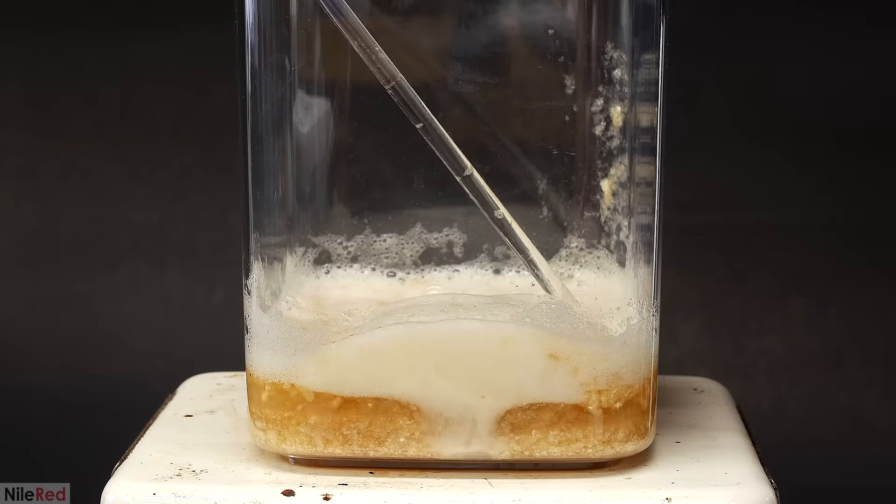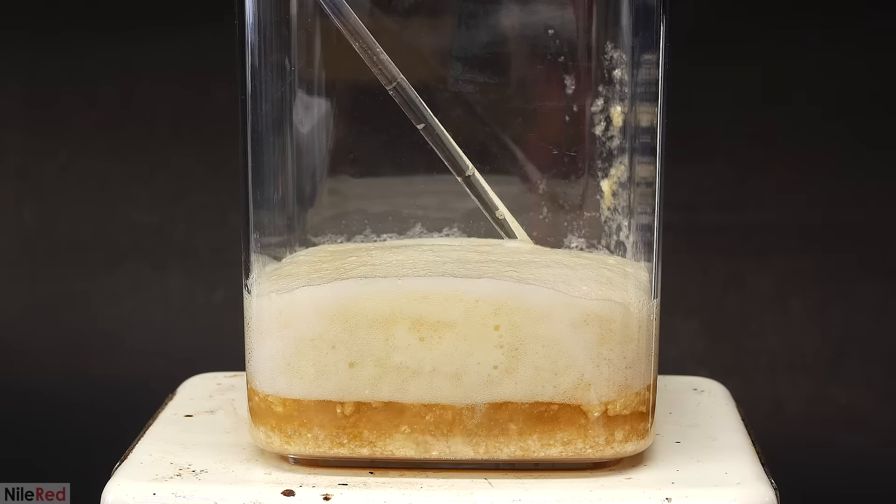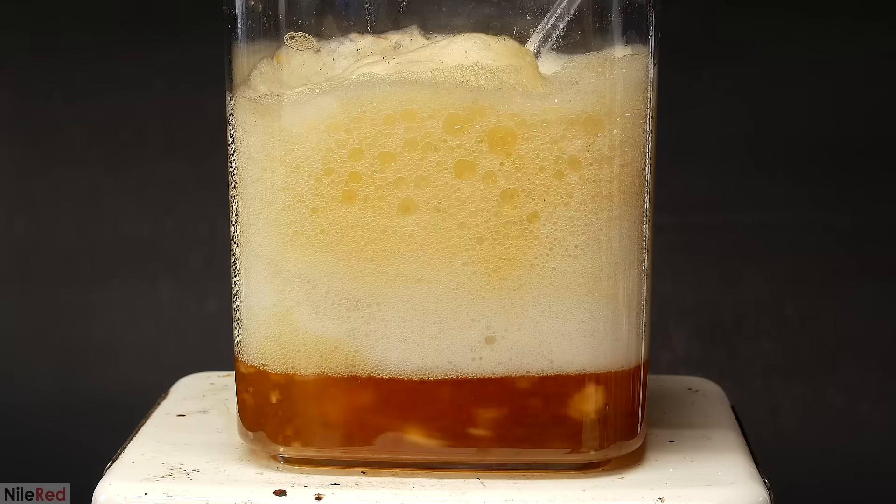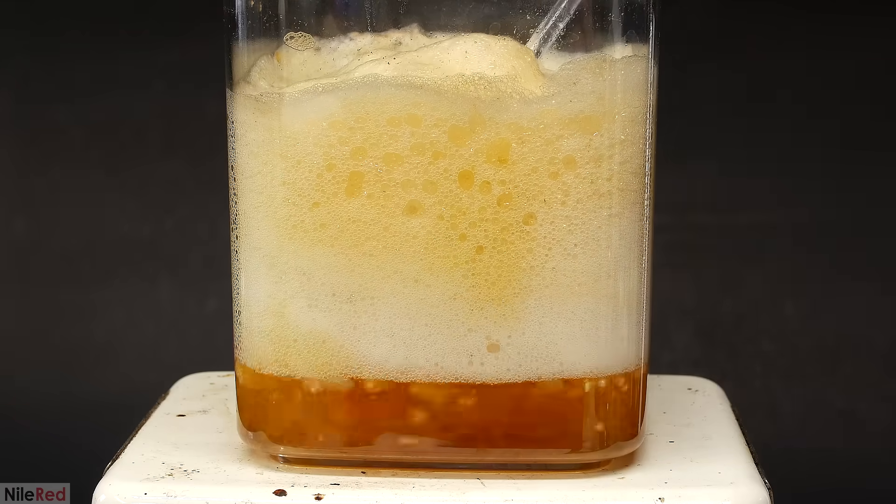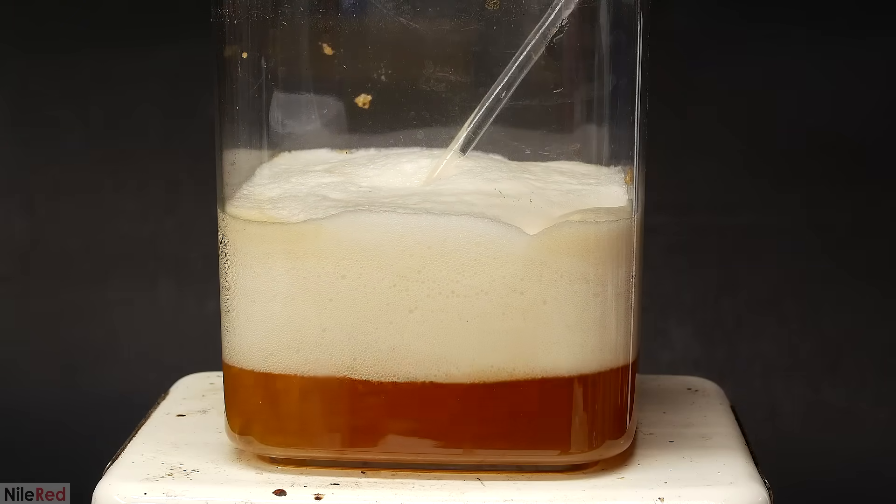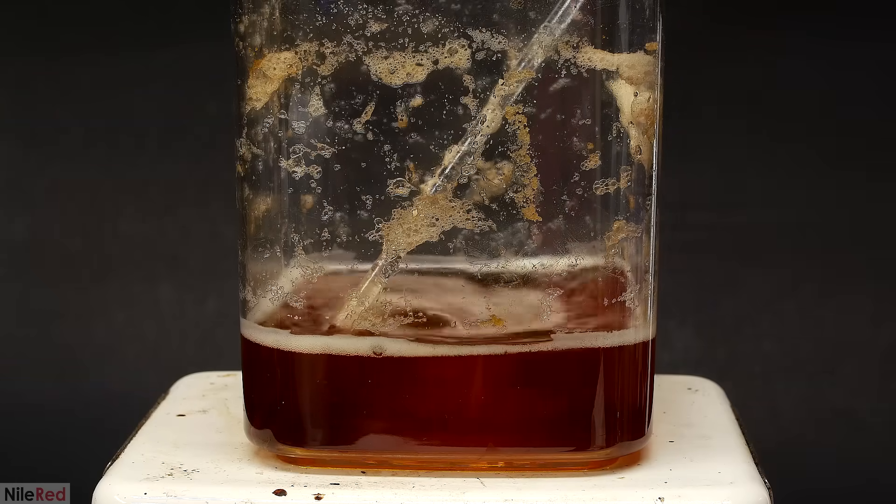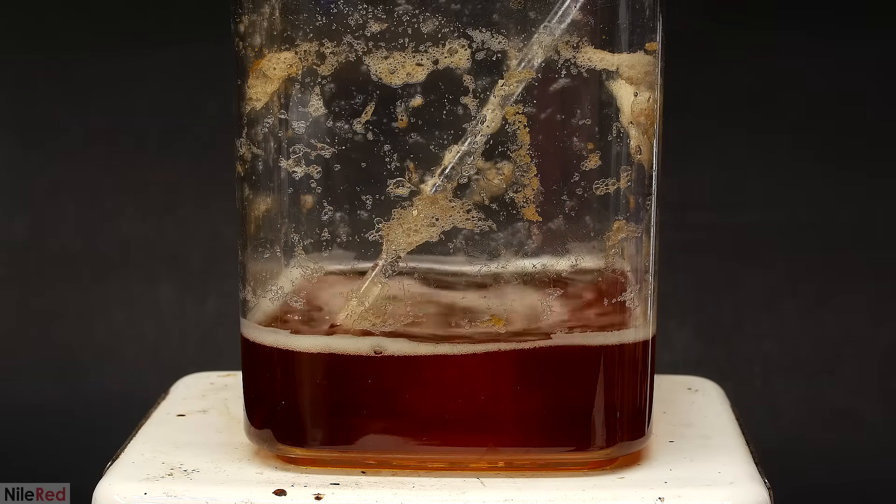and I realize that doing this in such a small container is a horrible idea. To prevent a disaster, I quickly transfer it to a larger one and continue the addition. The goal here is to just keep adding the potassium carbonate until all of the solid urea nitrate disappears.